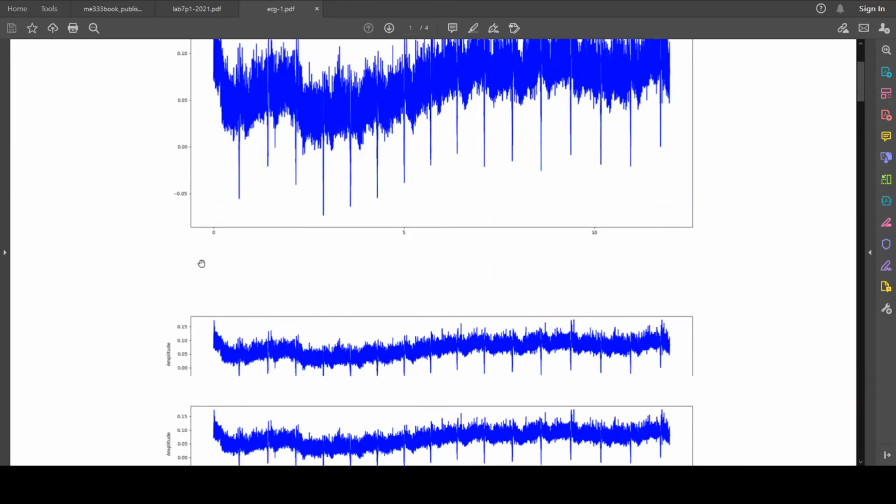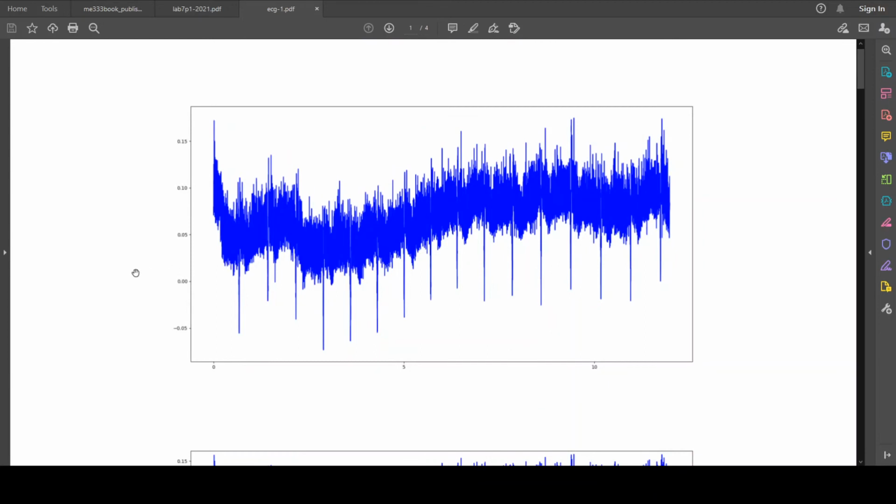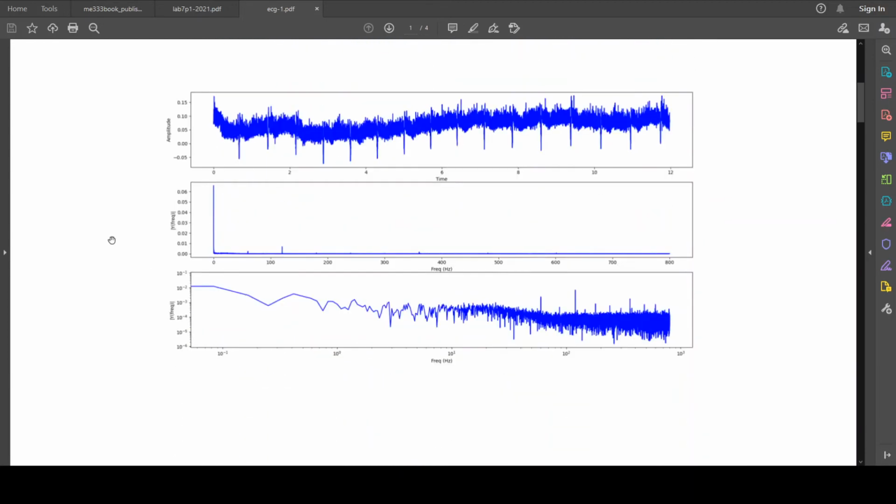To figure out what our amplification factor should be, our high pass, low pass, let's take an FFT of this raw signal. So here's the exact same signal again, and here's the FFT on a linear scale and a log-log scale. We expect our heart rate to be really low, in the 1 hertz area, so the log-log is more interesting here. So here's the 1 hertz area down here, and we see there's signals going on.